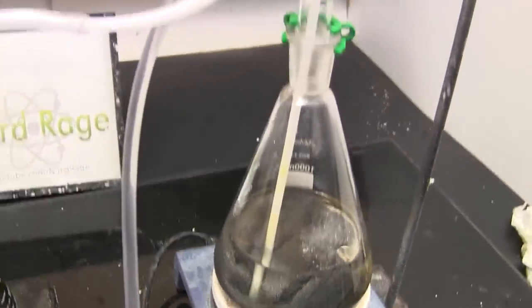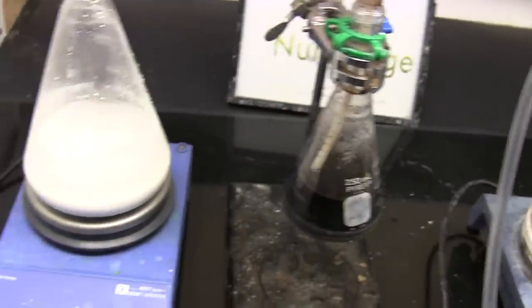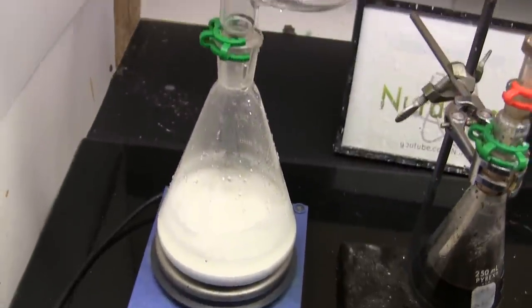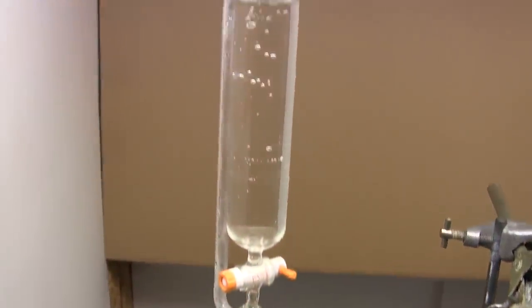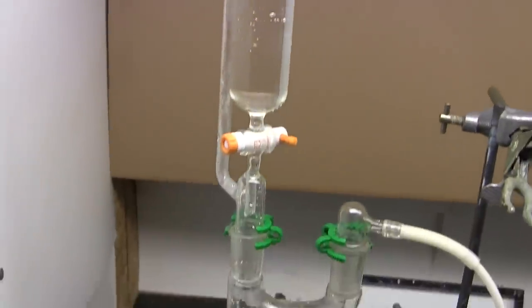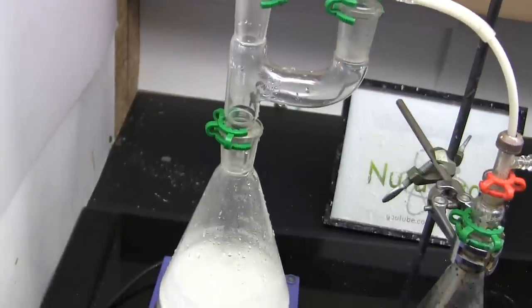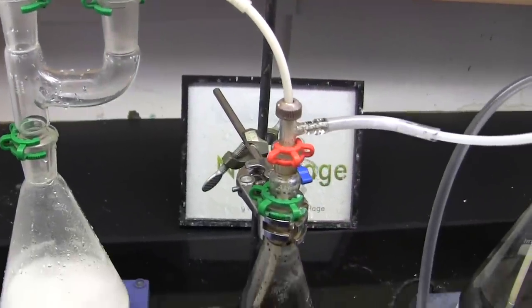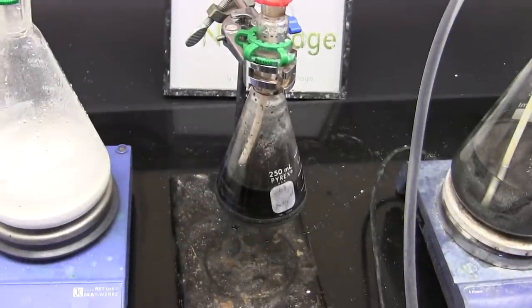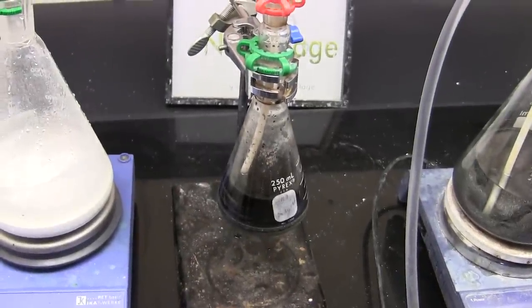Here's our mixture and around it we set up this chlorine generator. I've already detailed how to make chlorine gas in a previous video so I won't get into it here. My setup uses the trichloroisocyanuric acid and hydrochloric acid method. Now the chlorine gas generated is first led through this flask of concentrated sulfuric acid to dry it.